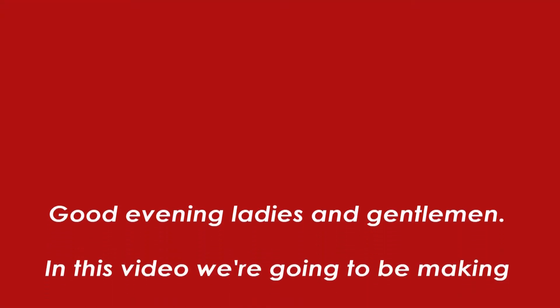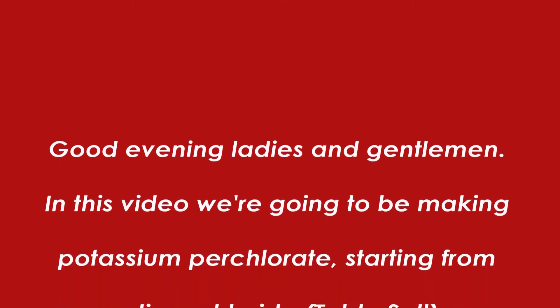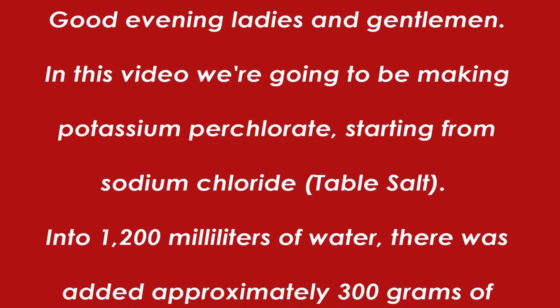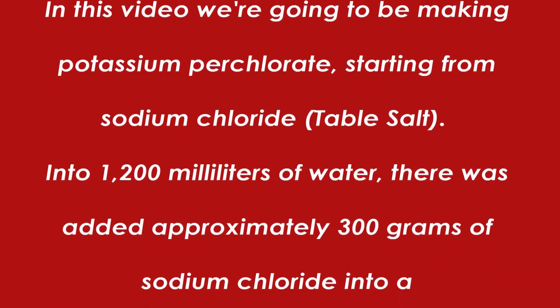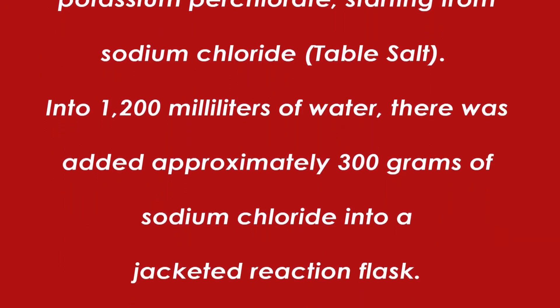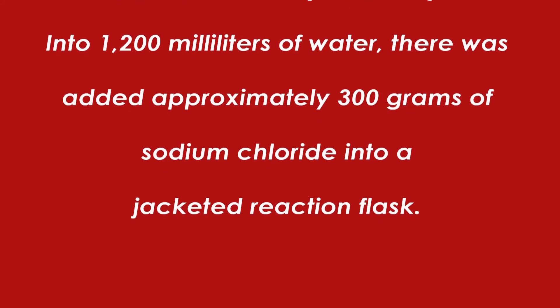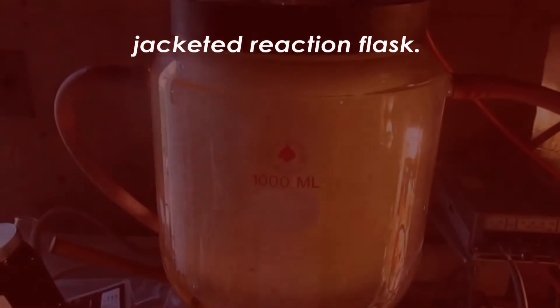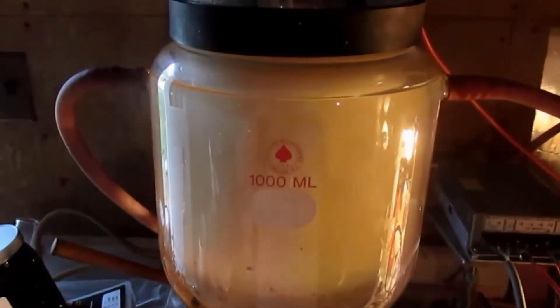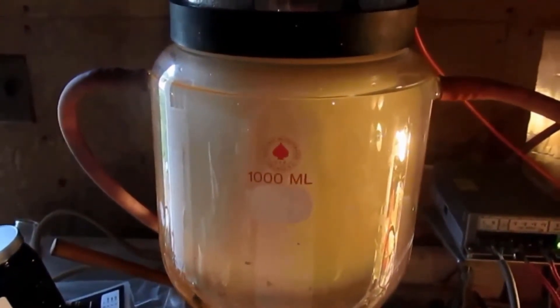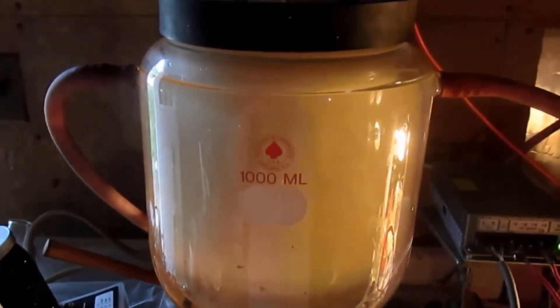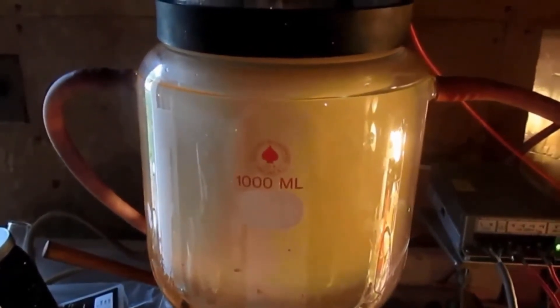Good evening, ladies and gentlemen. In this video we're going to be making potassium perchlorate starting from sodium chloride. Into 1200 milliliters of water there was added approximately 300 grams of sodium chloride into a jacketed reaction flask. The jacket isn't truly necessary, but I like to do this because it keeps the electrolyte from coming to a boil.